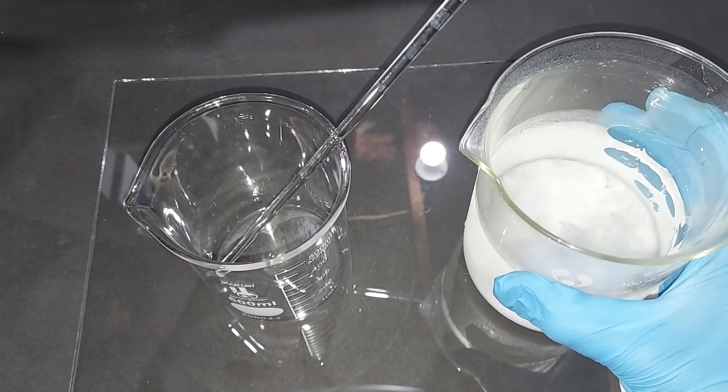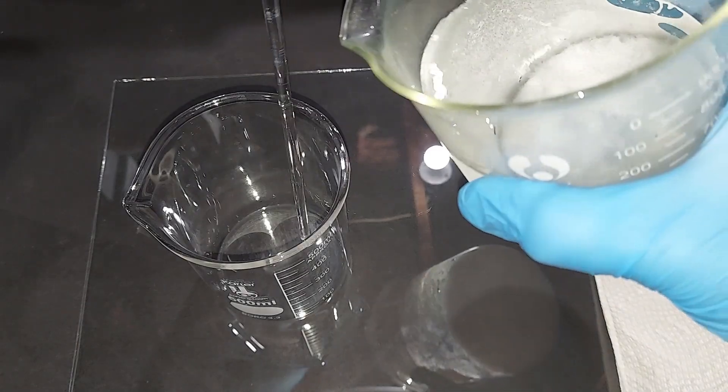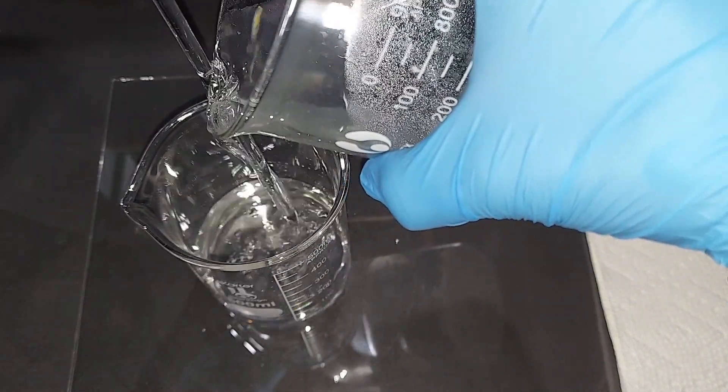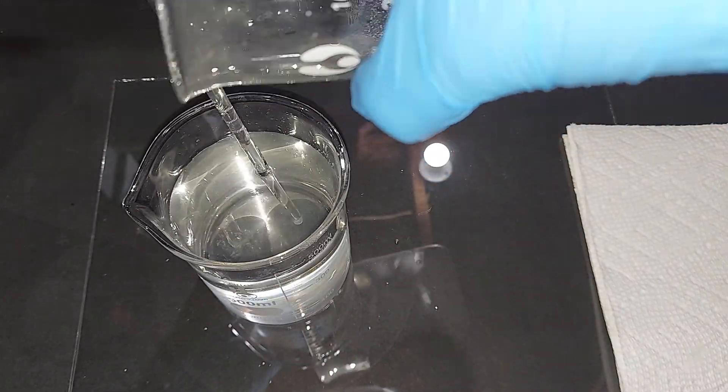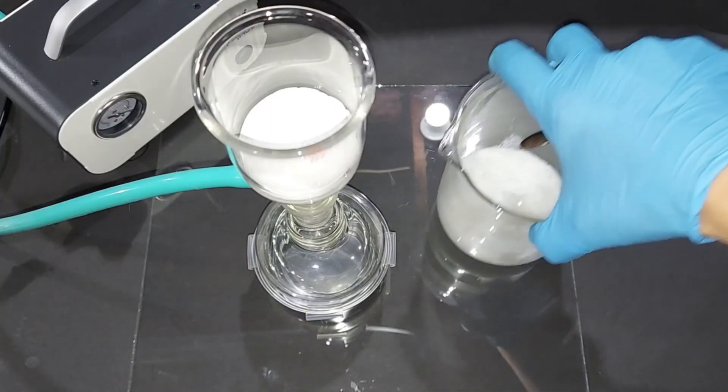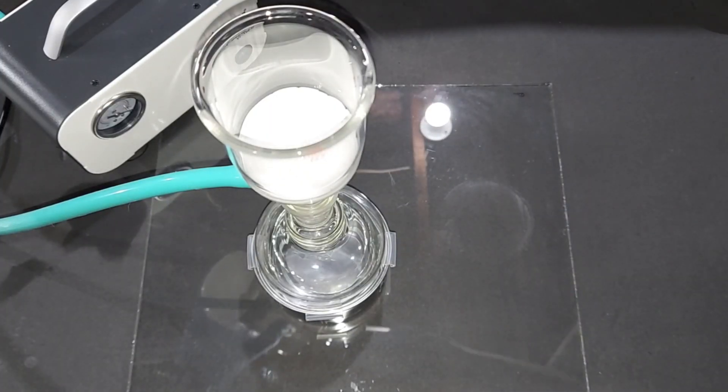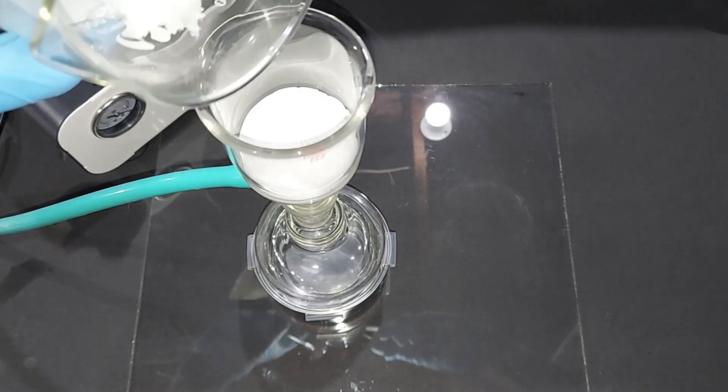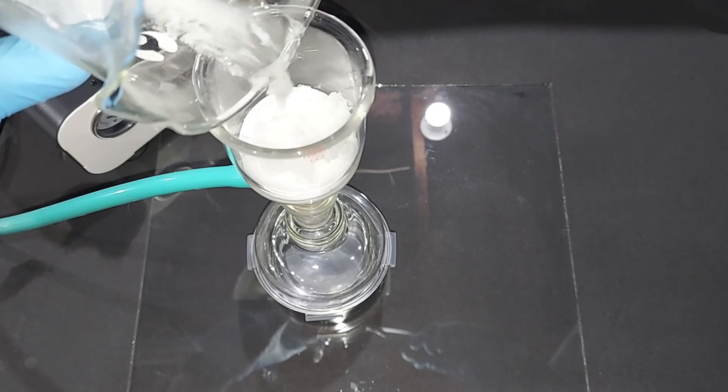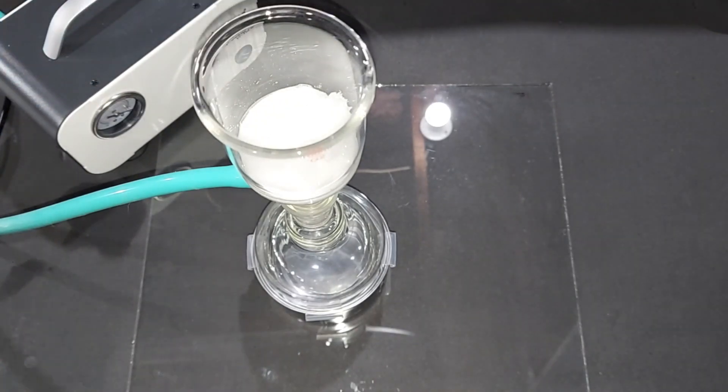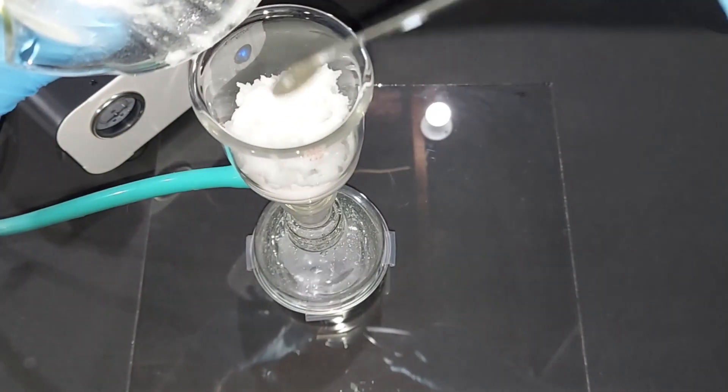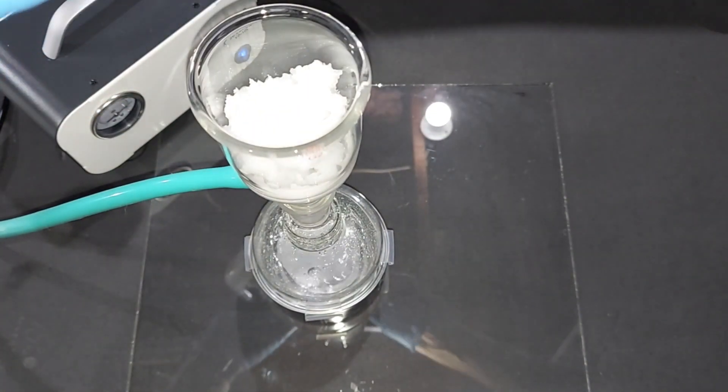Before I filter this, it makes sense to decant the liquid on top. Okay, there are the crystals. We're going to start filtering our potassium persulfate here. I do have a piece of filter paper in there. It's not necessary, but I just want to wet it first before I turn the pump on. I'll be back in a sec when I'm done.